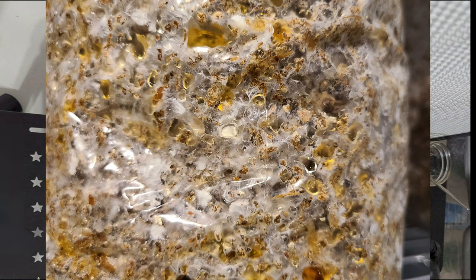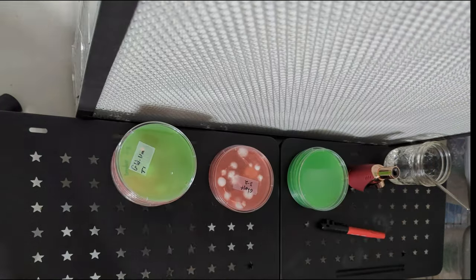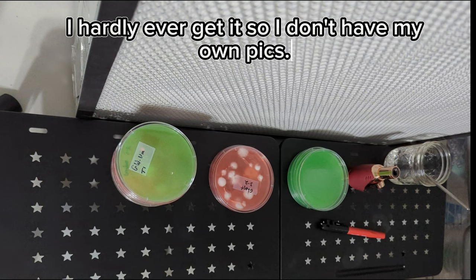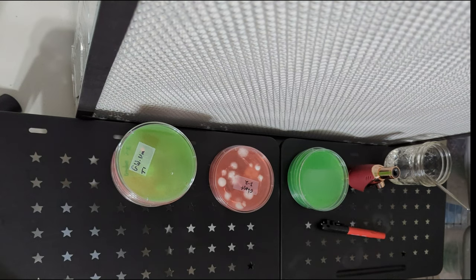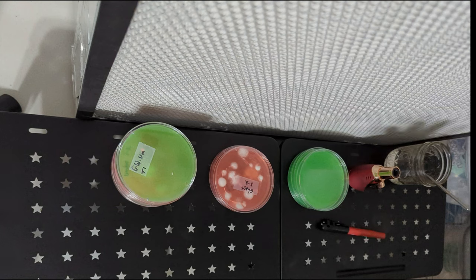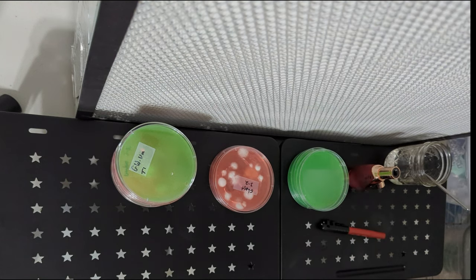Metabolites are produced by the mycelium when it is stressed. It doesn't always mean it's contaminated, but you should definitely pay attention to wherever it's produced. Metabolites are usually yellowish or amberish clear liquid. If you get any it will stick out. You can't miss it.